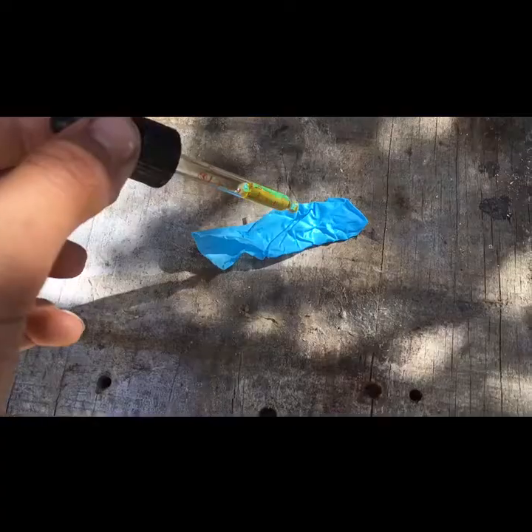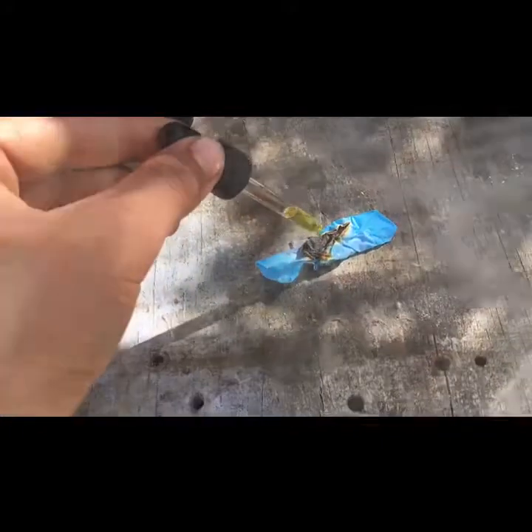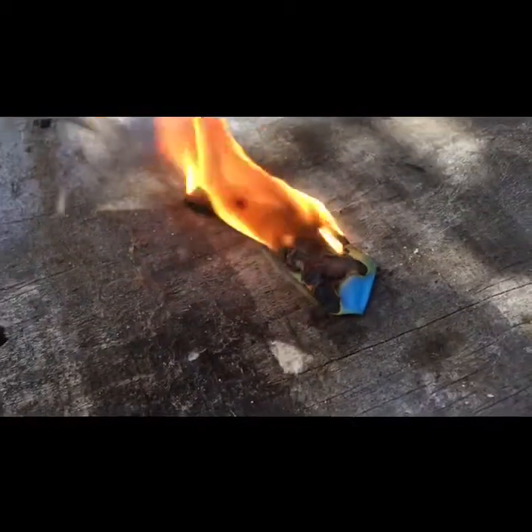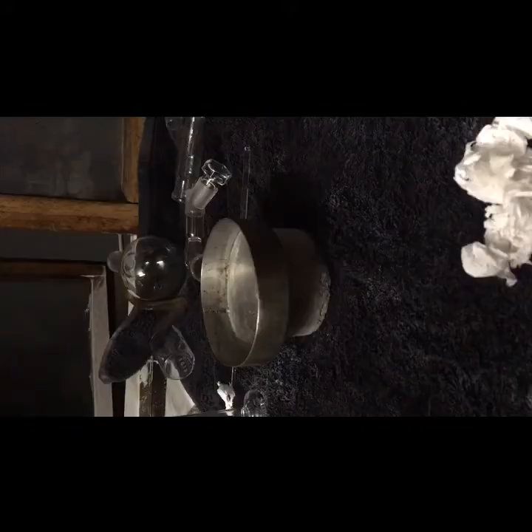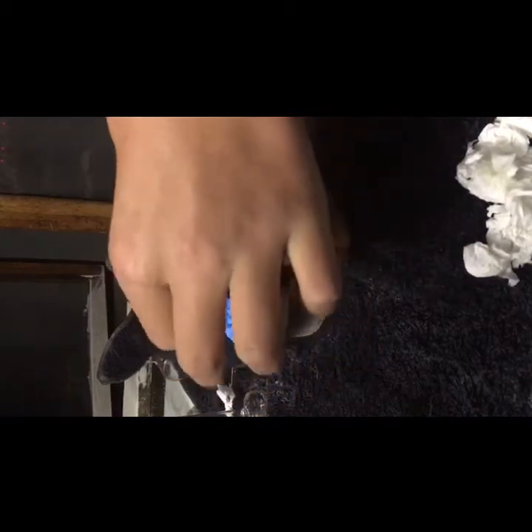It's reacting with a glove and steel wool. This is it reacting with a piece of a glove. Nitric acid is a really strong oxidizer, so it tends to really help out fires. As you can see in this clip, I keep dropping the nitric acid onto the glove, and you can see the bright flashes of light and the intensity of the flame increasing.